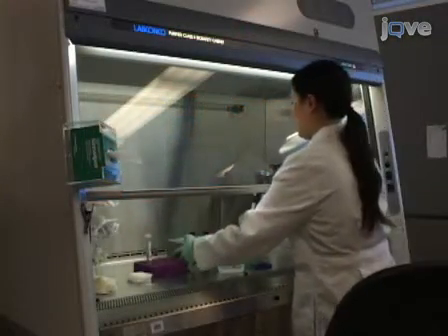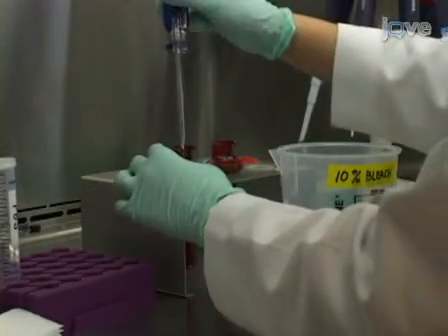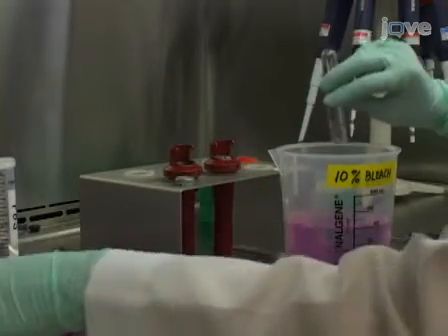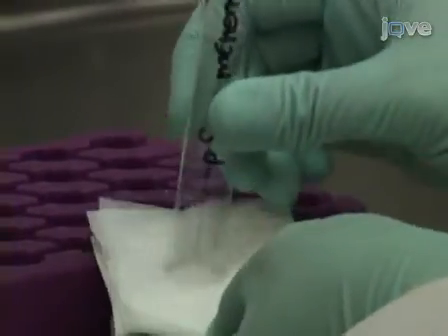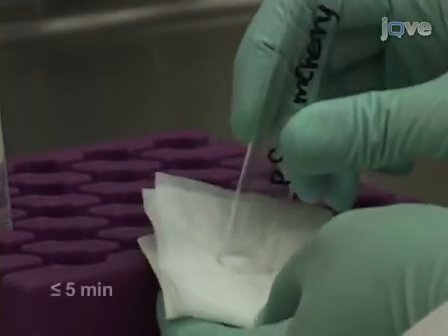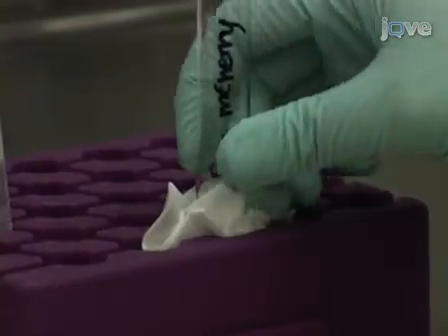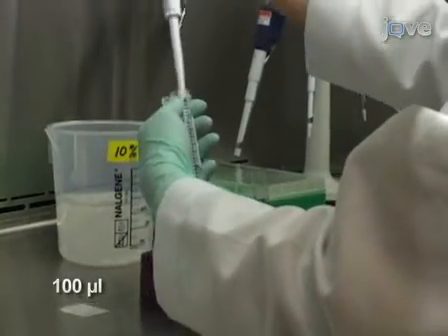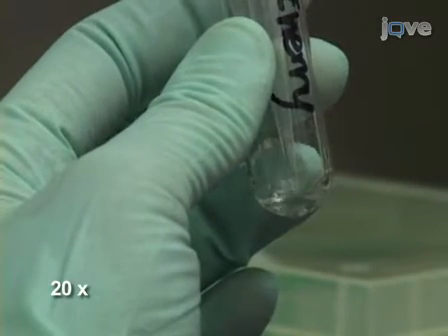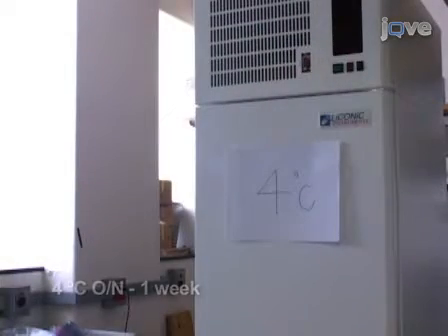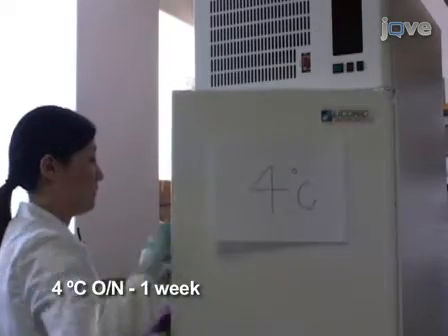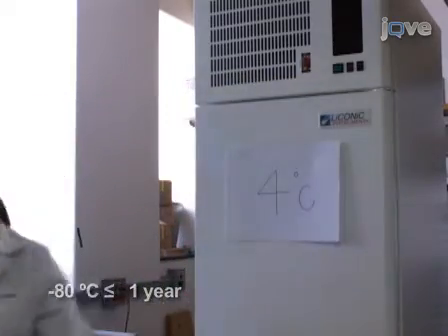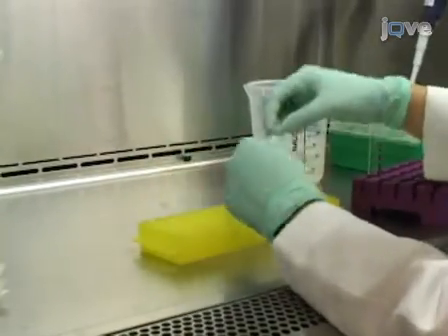After centrifugation, return to the tissue culture hood and invert the tube to pour the supernatant into a container with 10% bleach. Use a Kim wipe to absorb excess liquid around the pellet and invert the tube in a rack for no more than 5 minutes until ready to re-suspend. To re-suspend the viral pellet, use a filter tip to add 100 microliters of sterile pre-filtered PBS to your tube, then pipette up and down about 20 times. Leave the virus at 4 degrees overnight to complete re-suspension. You can store viral preps at 4 degrees for about 1 week and at minus 80 degrees for up to 1 year.